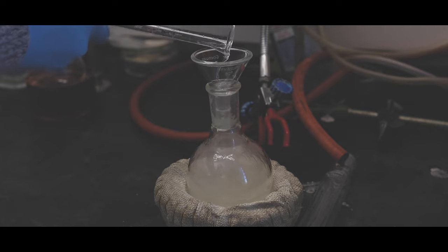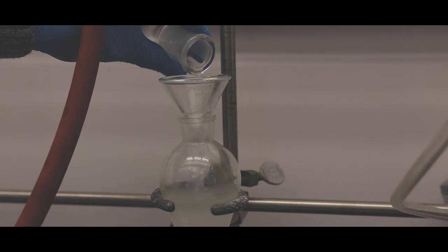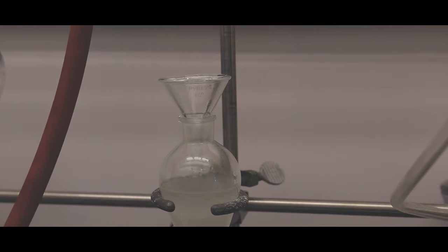After the reflux to synthesize the second batch of tryptamine, 60 mL of water was added to the solution and the layers were separated using a separatory funnel.